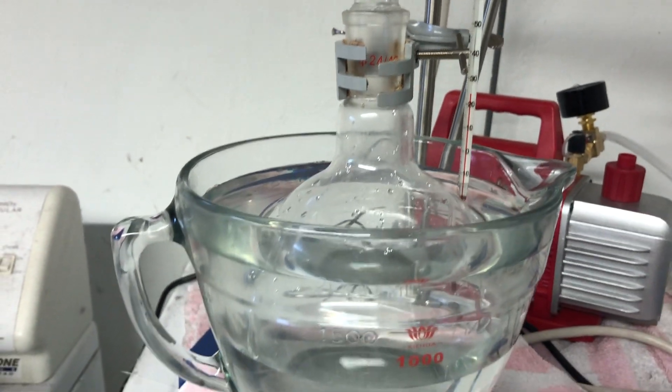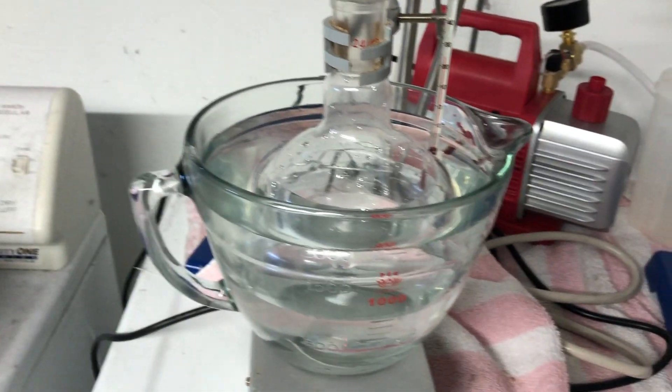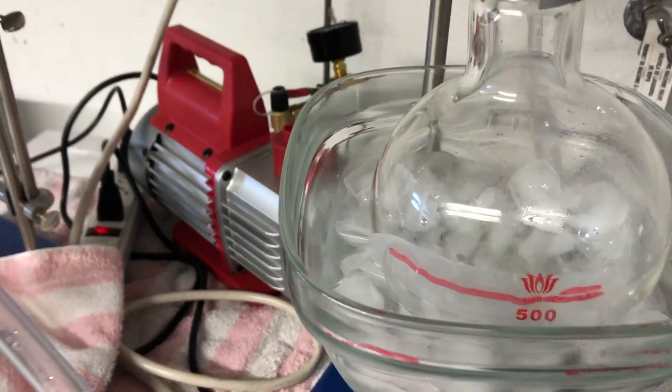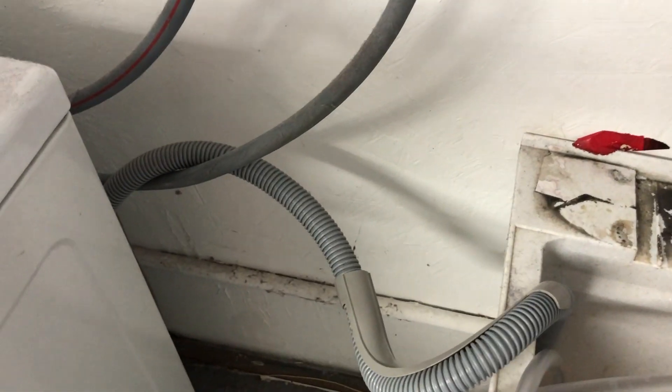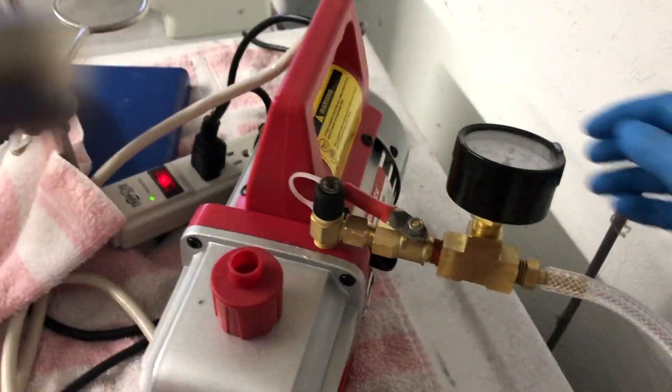Then maintain a vacuum and the water should come out. That'll take a little bit to heat up. And then the condensed side is over here. We're gonna run a little bit of water through our tubes. Keep this part nice and cool. And then over here we have our little vacuum pump.